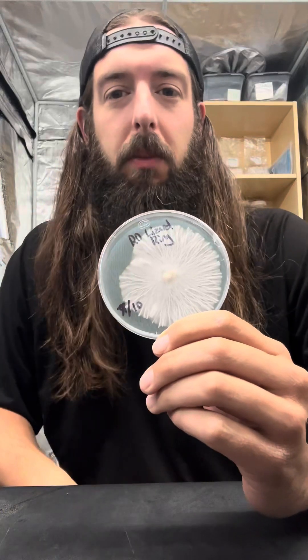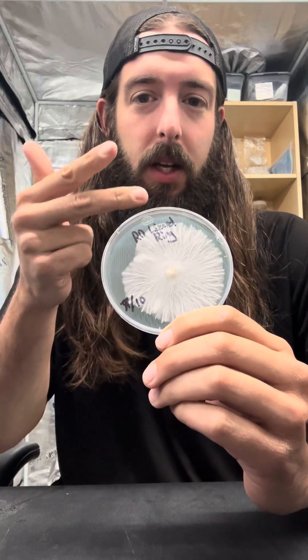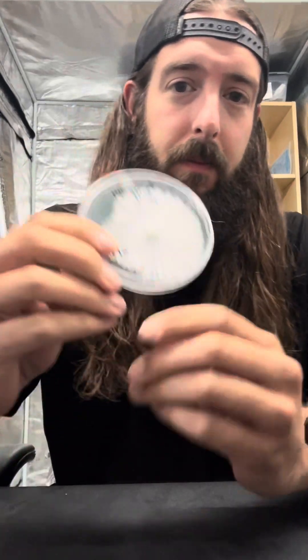What's up everybody? Let me go over tissue samples, cloning, isolating, and agar transfers and the differences between the four.